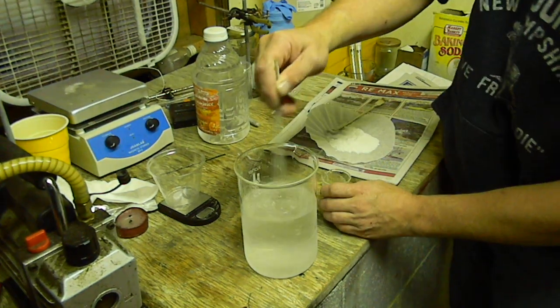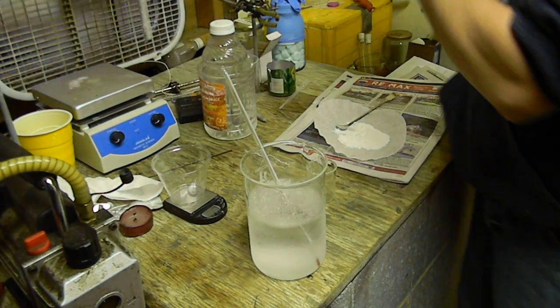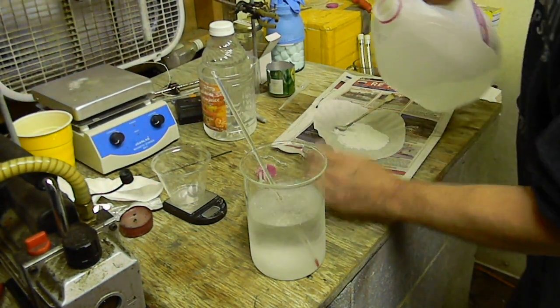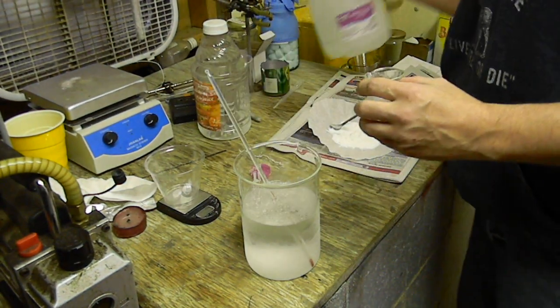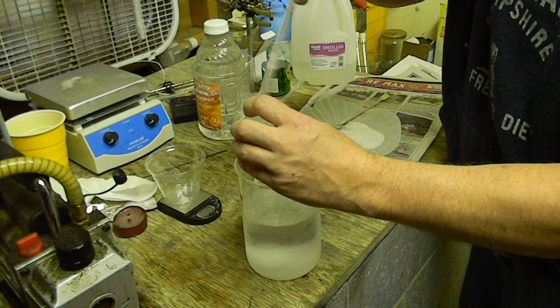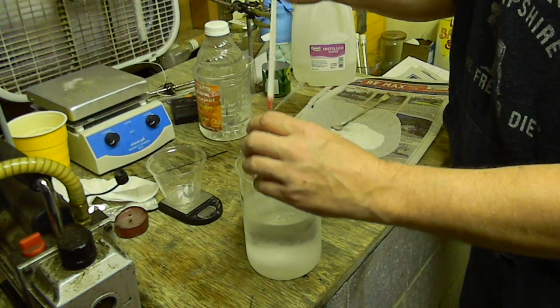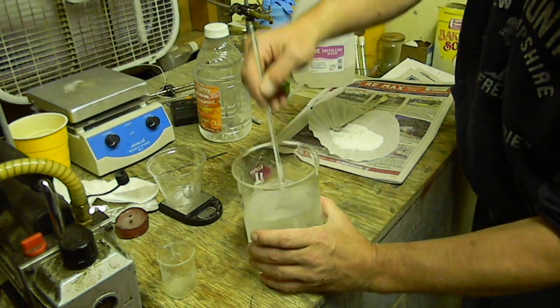Ta-da. A little teeny bit of fresh water. And it literally will become sticky to the glass.